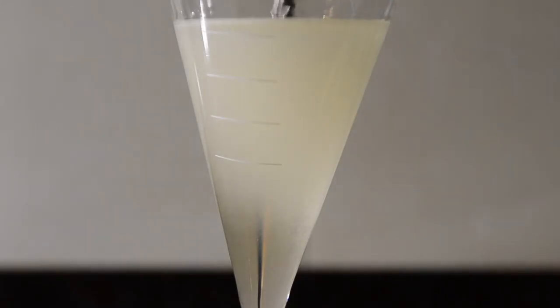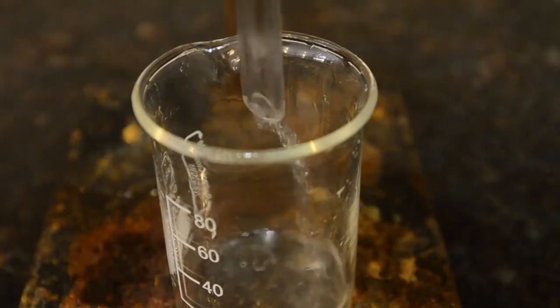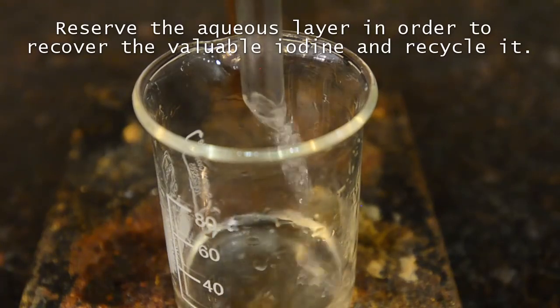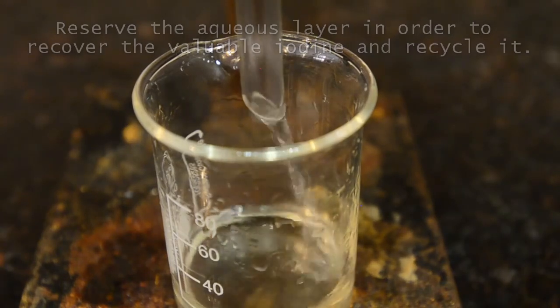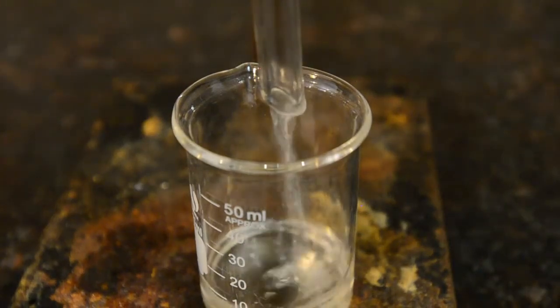After a good shake, the layers separated nicely, with the top layer being our organic solvent. We drained off the bottom aqueous layer and reserved it so that we could recover the iodine. We'll explain that later. Then we drained off the organic dichloromethane layer into a beaker.